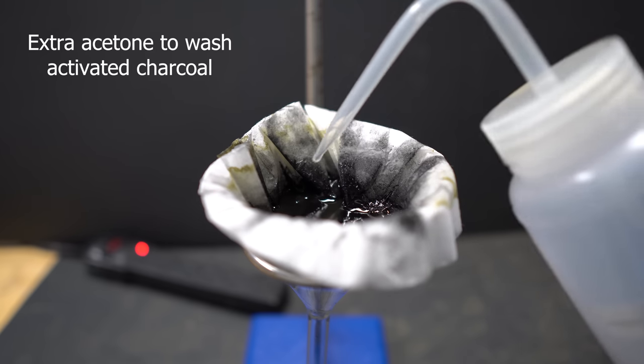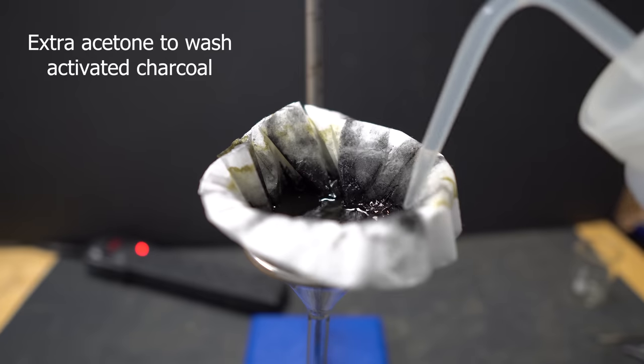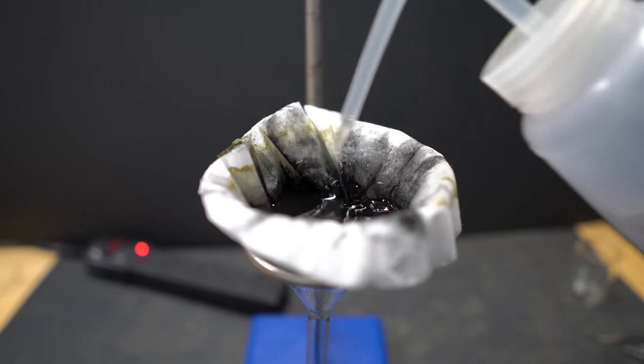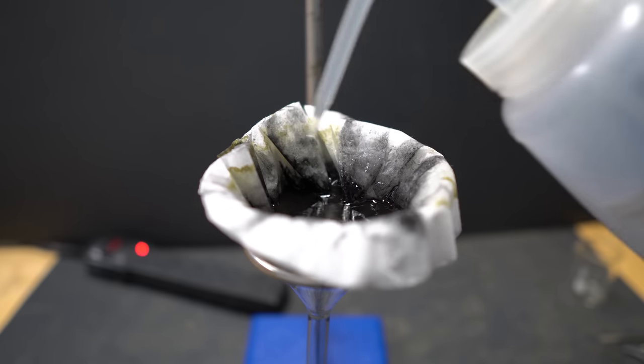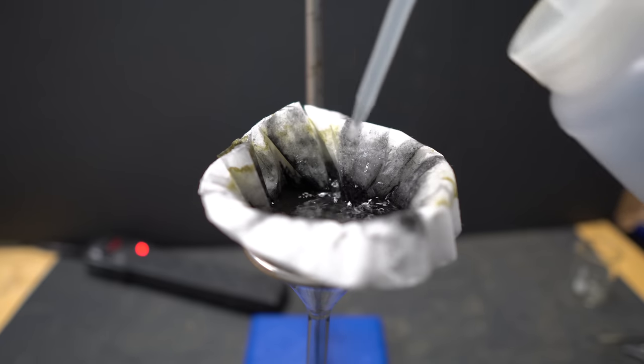I used an excess amount of acetone just to make sure that all the Salvinorin A was pushed through the carbon and down into our beaker. A column would have been way more efficient and way better, I just didn't have one and had to make a makeshift one.